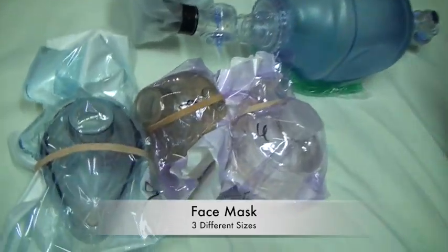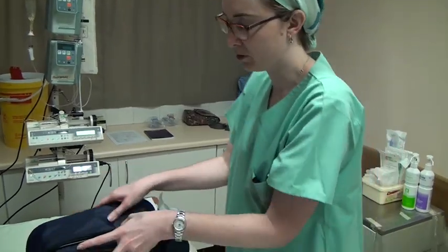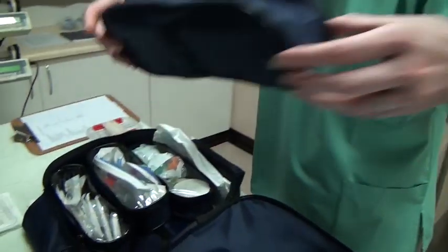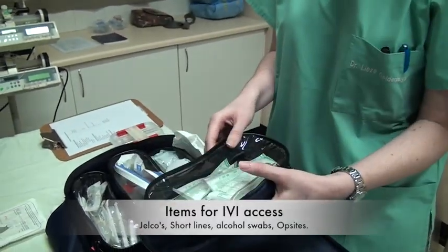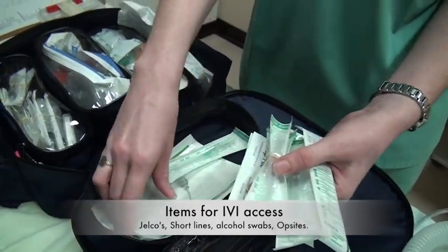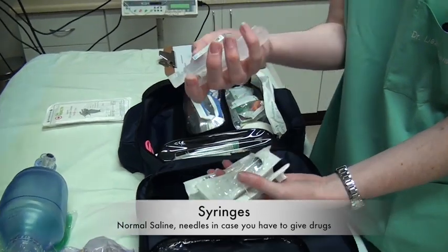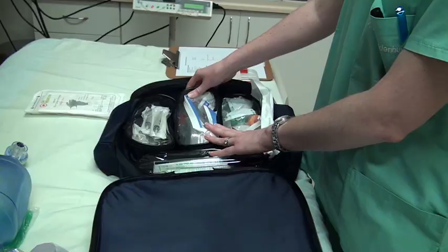You need a bag-valve-mask resuscitator with oxygen tubing and face masks in three different sizes. The bag opens up completely. Inside you'll find sterile gloves — these come out and have velcro on the back so you can remove them easily — as well as Jelcos, alcohol swabs, a short line, strapping, syringes, saline flush, and needles if you need to administer any drugs.